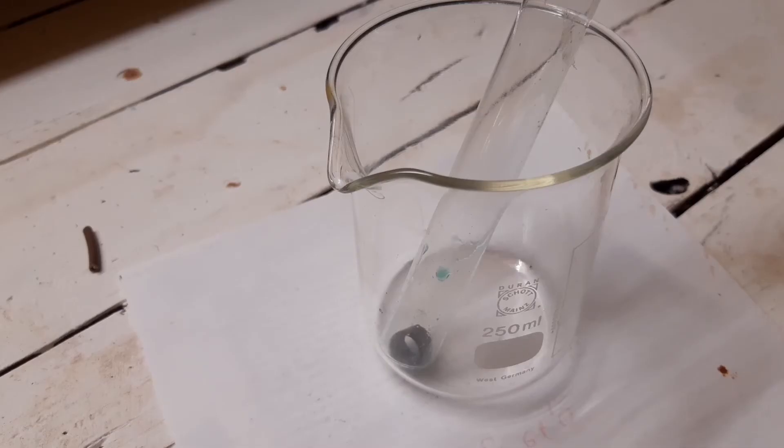Just to show you that I'm not bullshitting around, I have the standard copper test which all cool kids do. I believe very concentrated nitric acid reacts slower with copper, so... oh, look at it go.